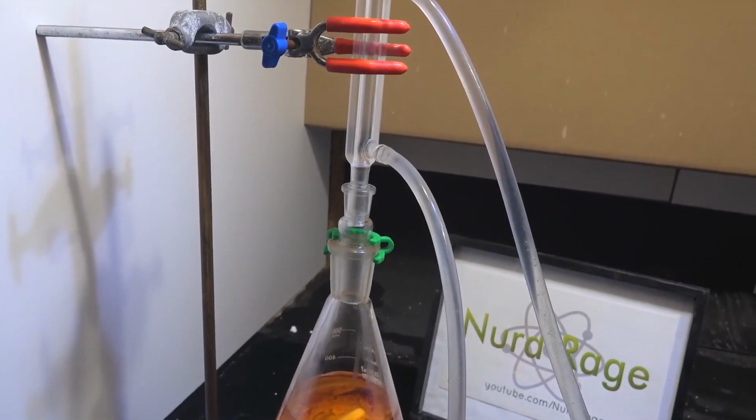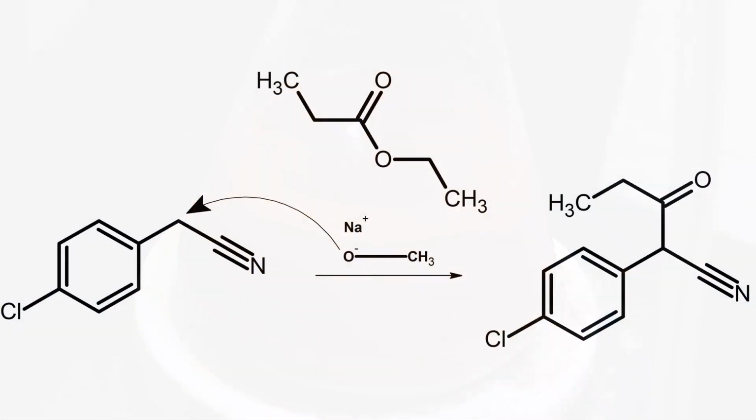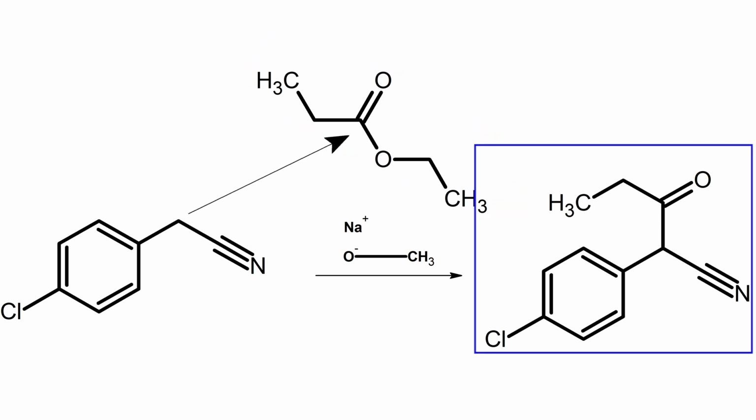Now assemble a reflux condenser onto the flask again and gently heat until it starts refluxing. What we're doing is using the sodium methoxide to deprotonate the para-chlorophenyl acetonitrile and then react that with ethyl propionate to make 2-para-chlorophenyl 3-oxopentane nitrile.